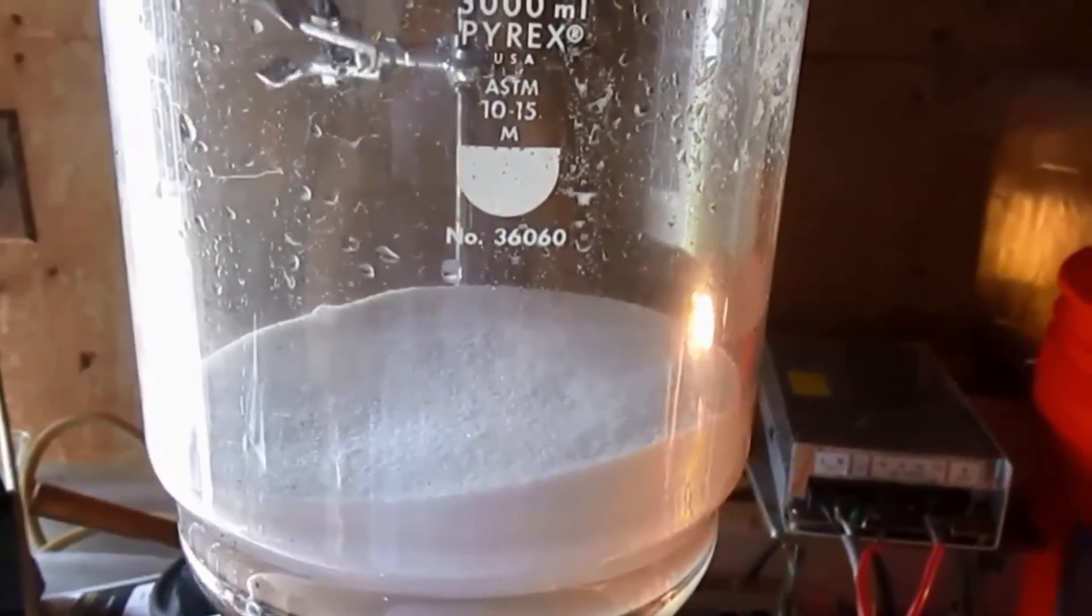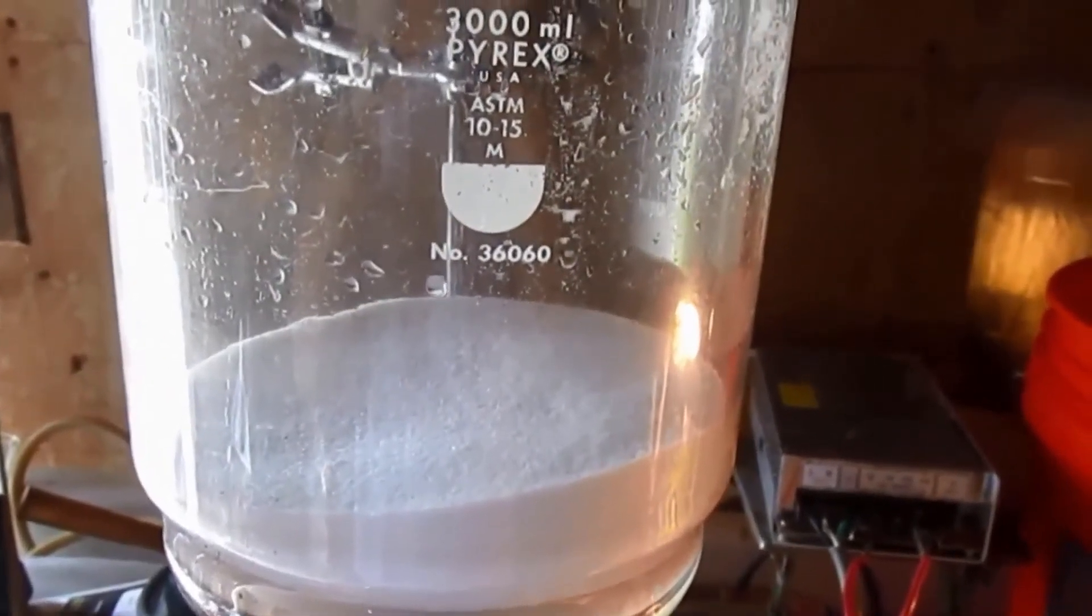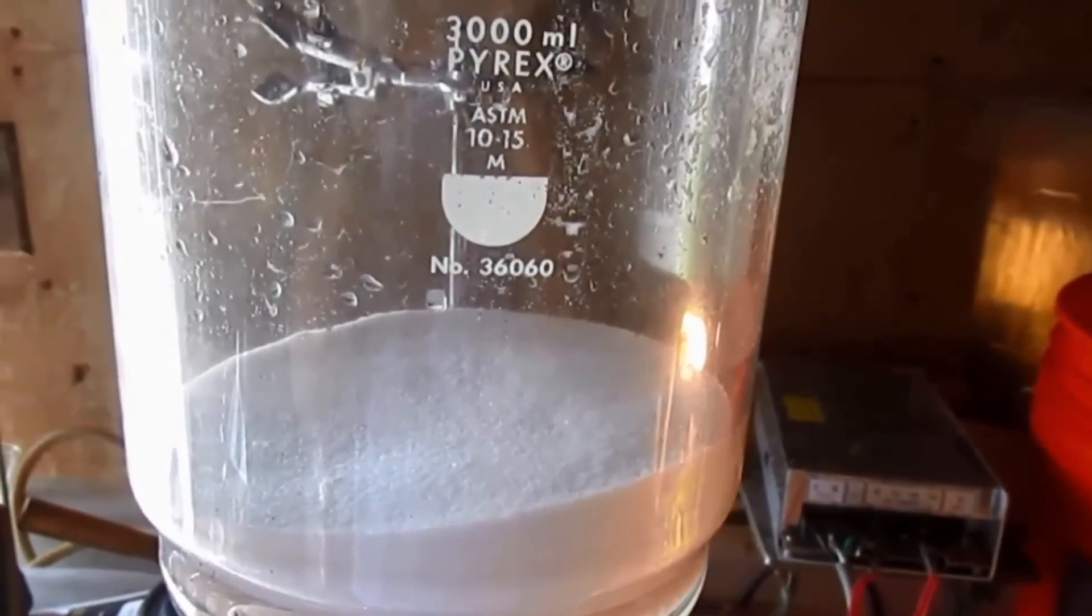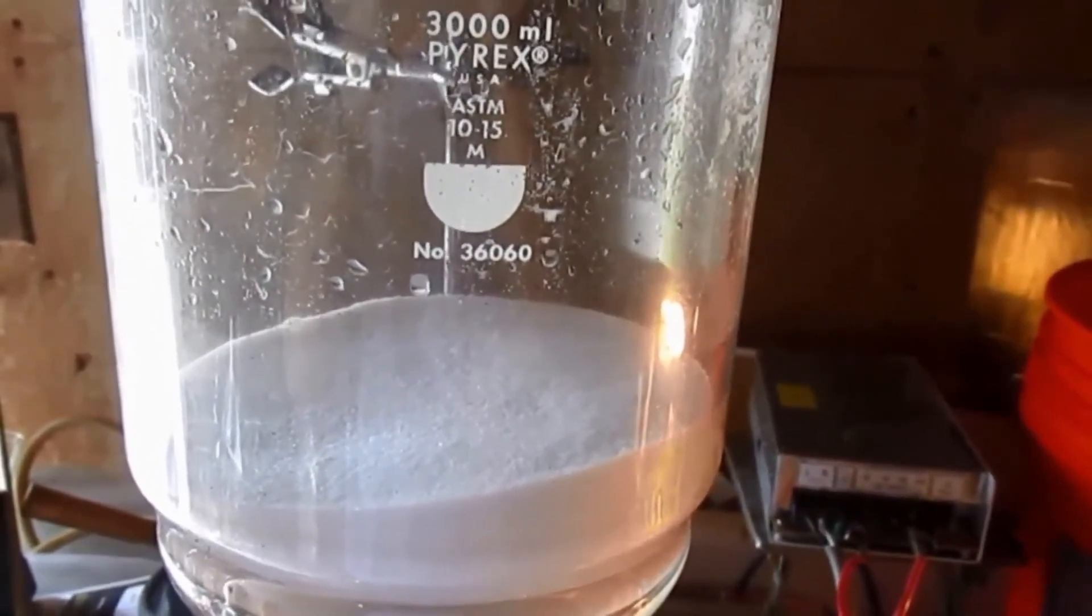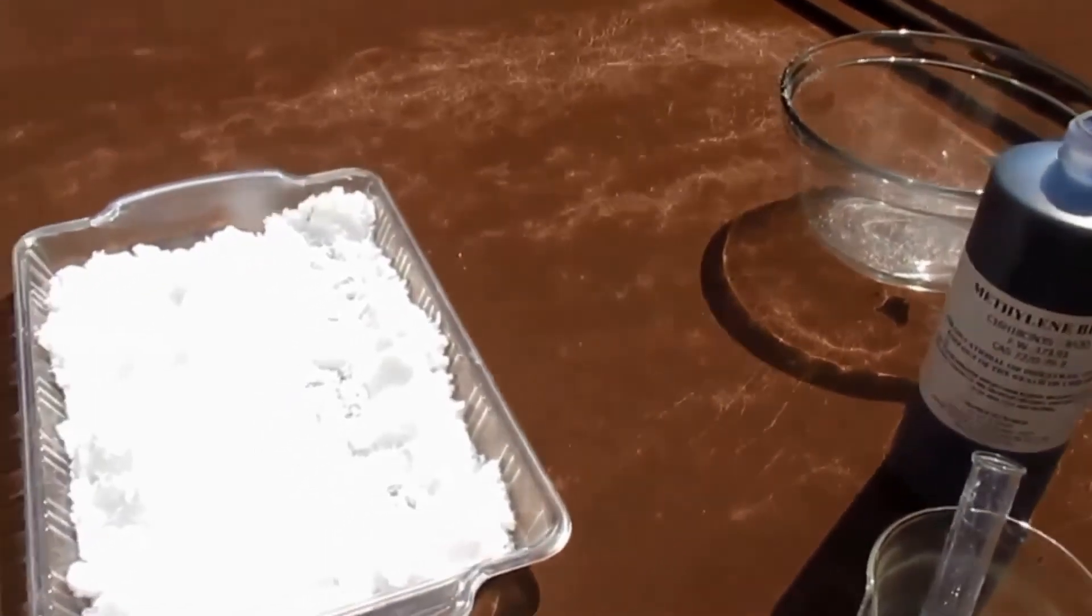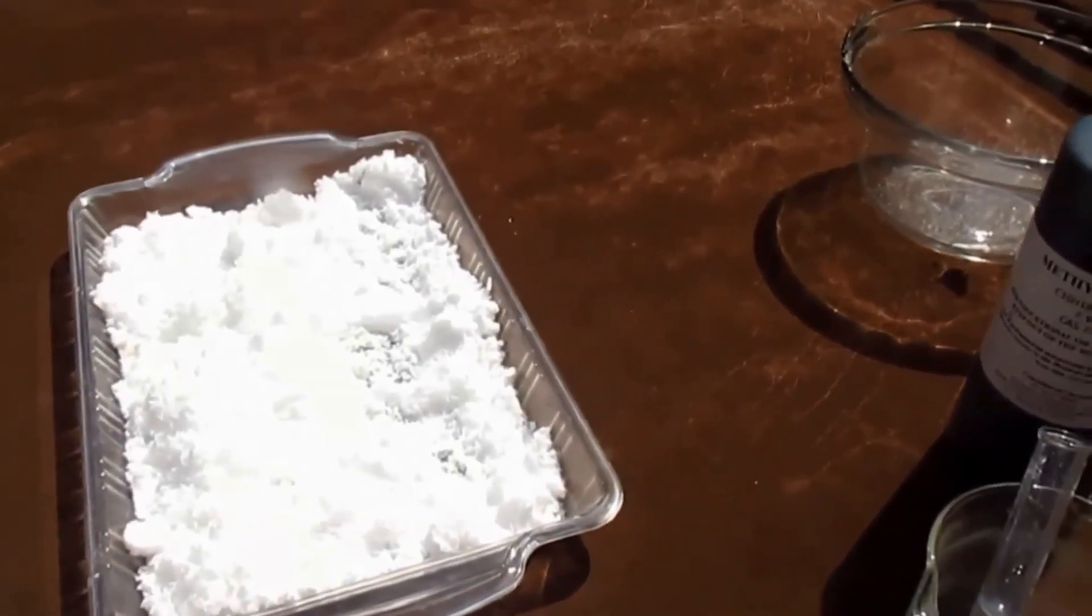The potassium perchlorate is now washed again with cold water to remove any residual potassium chloride. From vacuum drying and allowing it to dry in the sun, most of the water evaporated.